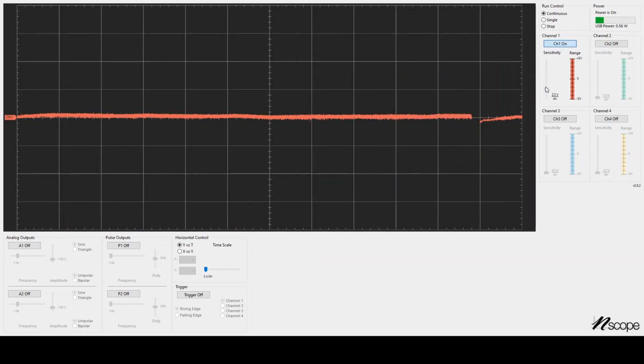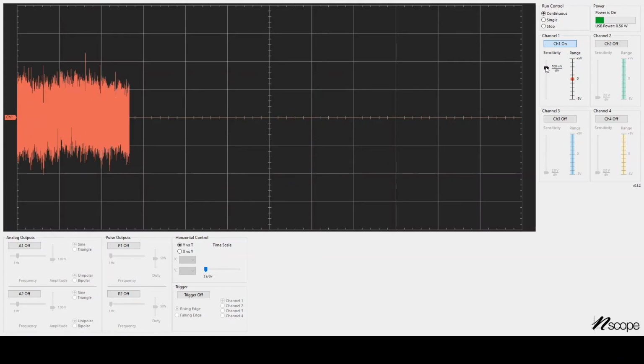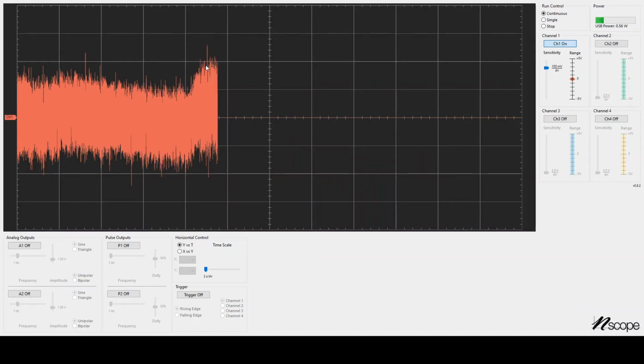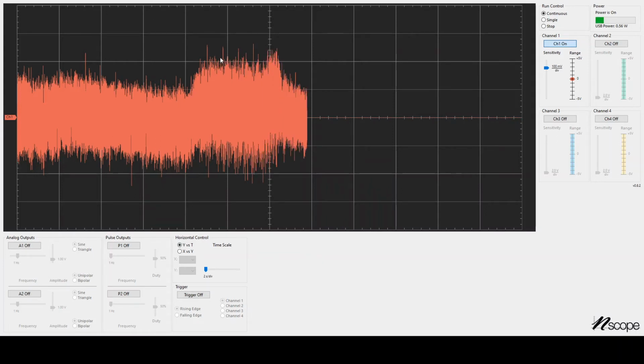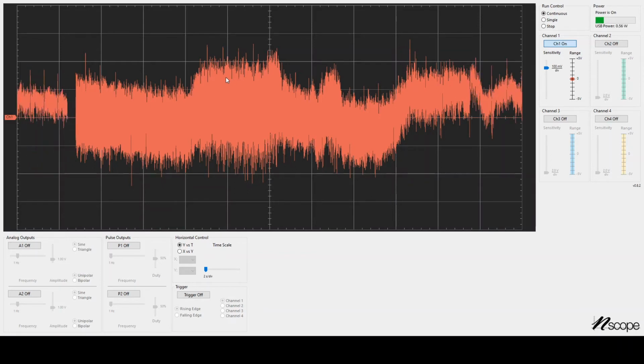I'm going to zoom into maybe like 100 millivolts. And this is the signal coming from the instrumentation op amp. Don't really see a heartbeat, but I can kind of every once in a while, maybe once a second, see a big spike. The reason for the huge amount of noise on here is that my laptop is plugged into the charger right now. So it's coupled to the world, which in the US is covered in 60 hertz noise because the AC frequency in the wall is 60 hertz.